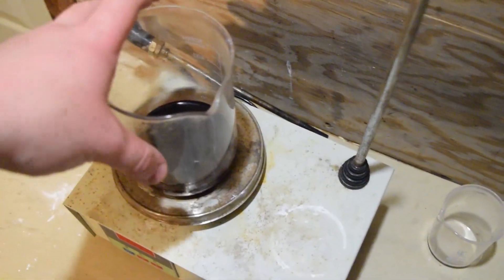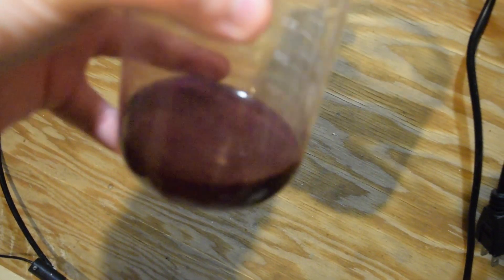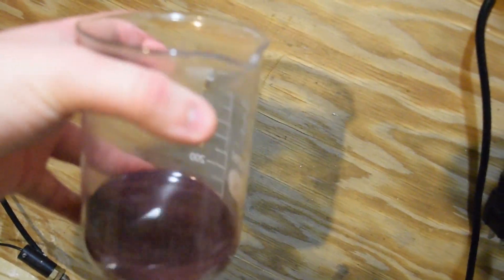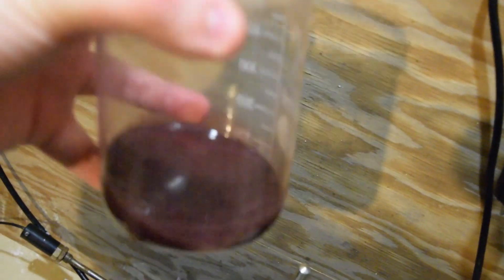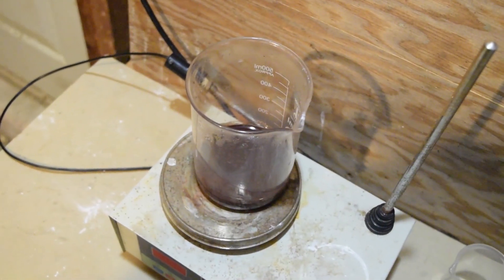Quick update — something really exciting. As this cooled down in front of the fan, look at that — started to get some precipitate! Awesome. So I'm going to add this in, but this was not a failure. That makes me very happy. I actually got something from that even though I messed up pretty bad. That just goes to show: don't give up on your chemistry projects, even if they don't succeed at first.